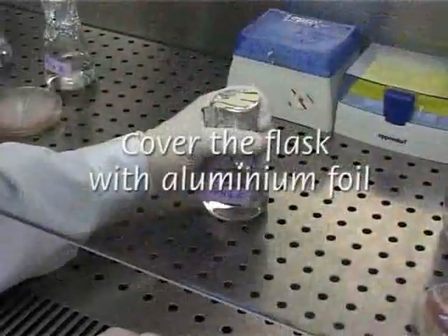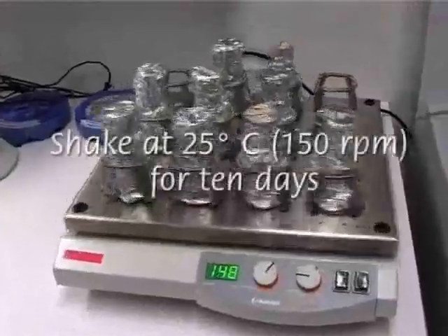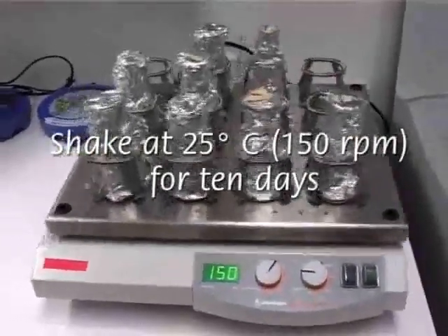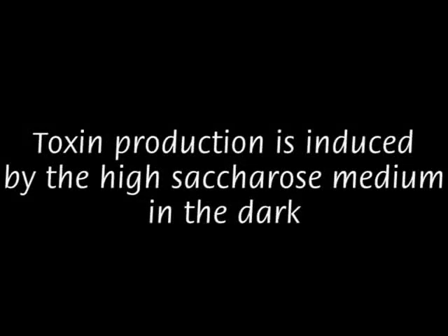Toxin induction is more efficient in the dark, thus the flask is covered in aluminium. Cultures are then shaken for 10 days at 150 rounds per minute at 25 centigrade. The medium is of acid pH and contains a highly concentrated saccharose solution that, together with darkness, is known to facilitate toxin synthesis in Fusaria.